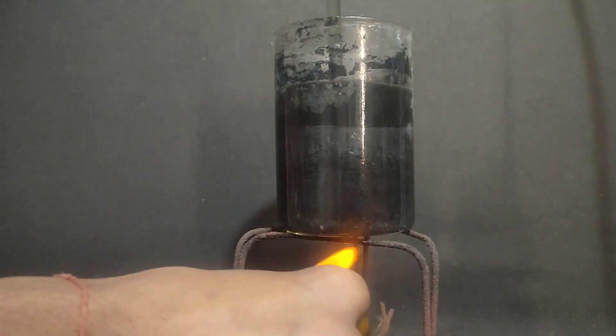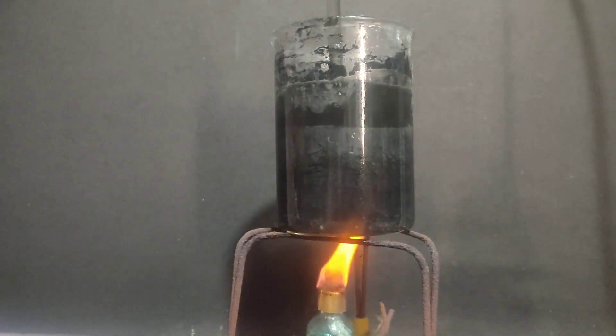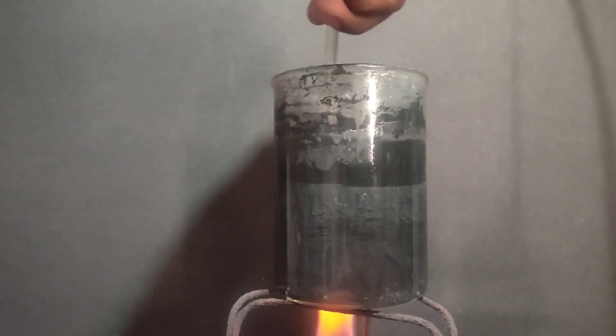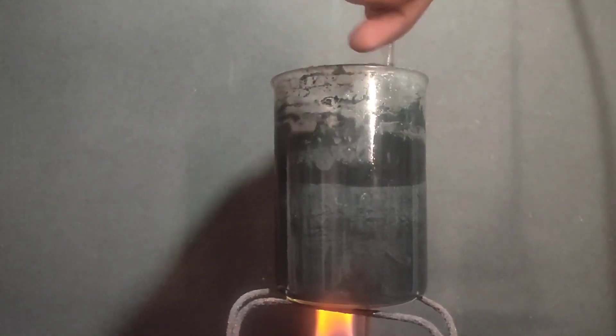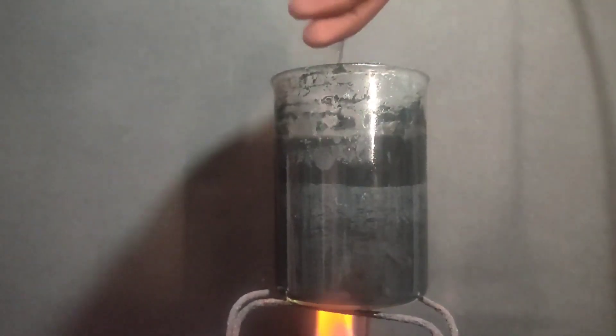Then I heated this solution to boiling. On boiling, all the potassium hypochlorite will decompose into potassium chlorate and the potassium chlorate will dissolve in the water. On dissolution we will be able to filter off the solution to separate our potassium chlorate from this black precipitate.